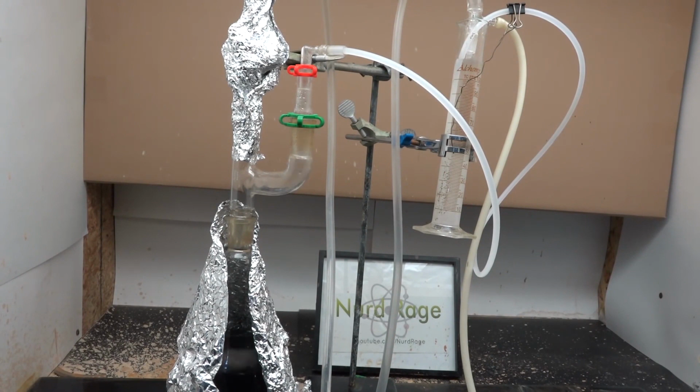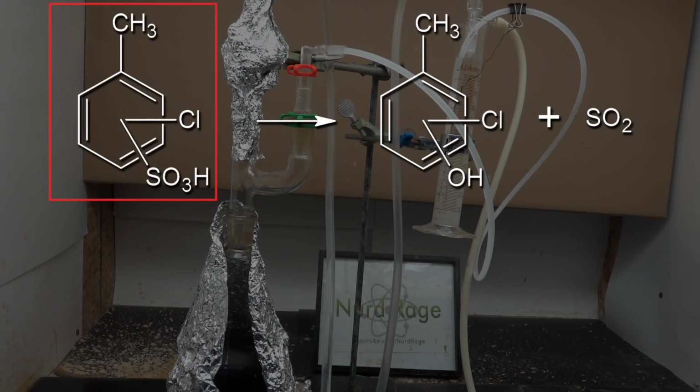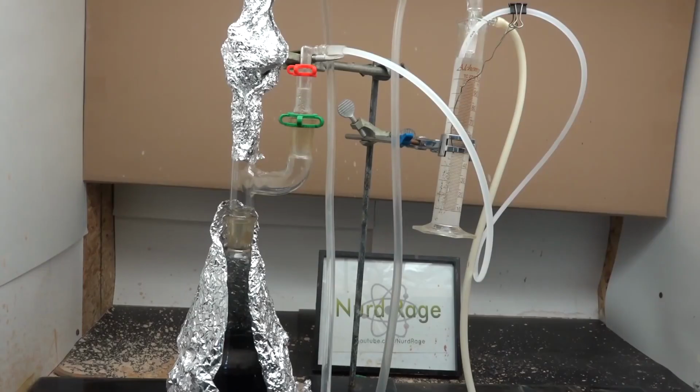Now you're probably wondering, if I know this mixture is 60% orthochlorotoluenes, which I want to remove, why did I only add 1/3 equivalent of sulfuric acid, which is not enough to remove it all? Well, I did try adding a stoichiometric equivalent, but I then noticed a large amount of decomposition happening. The chlorotoluene sulfonic acid decomposed at high temperatures and concentrations to chlorocresols and sulfur dioxide. By limiting the sulfuric acid to 1/3, we limit the concentration of chlorotoluene sulfonic acids and thus limit the decomposition. Okay, looks like we're done.